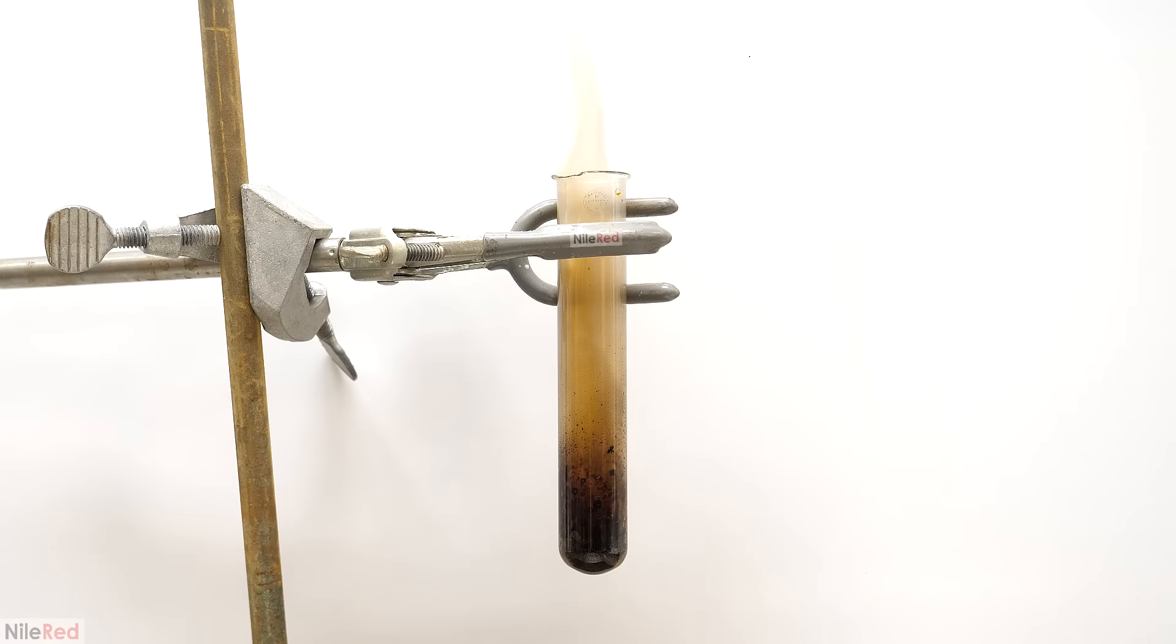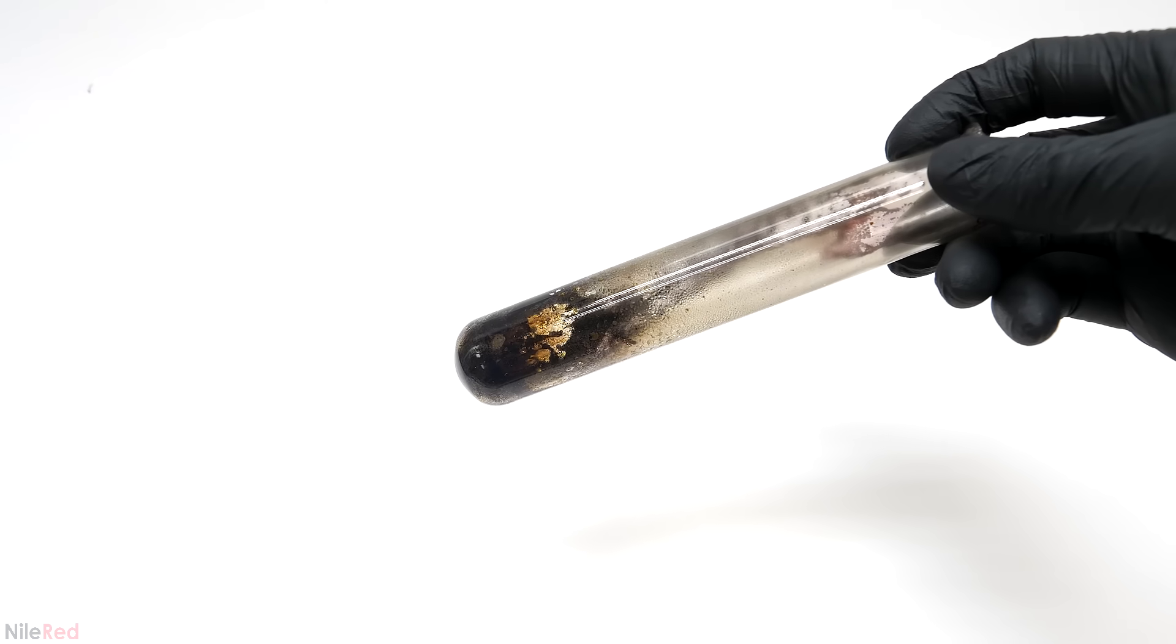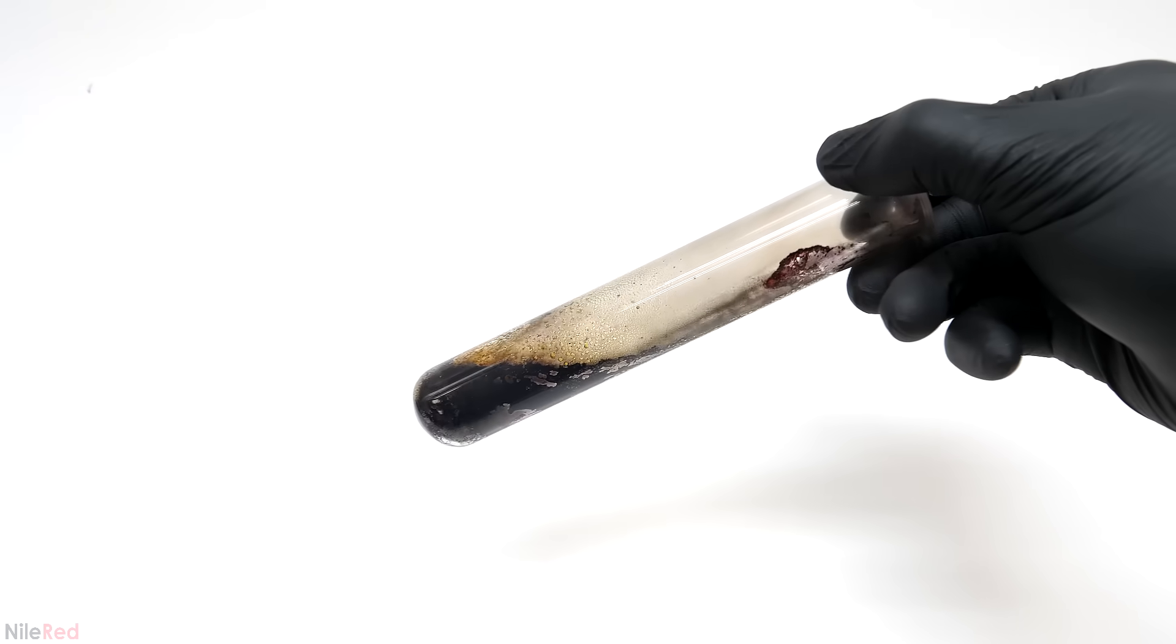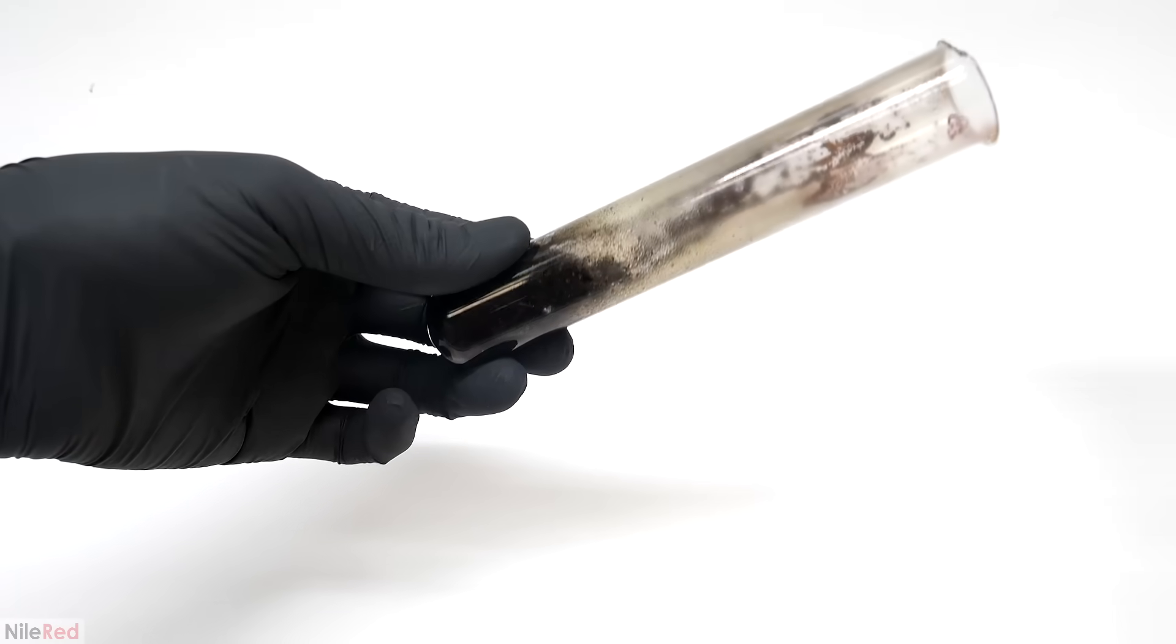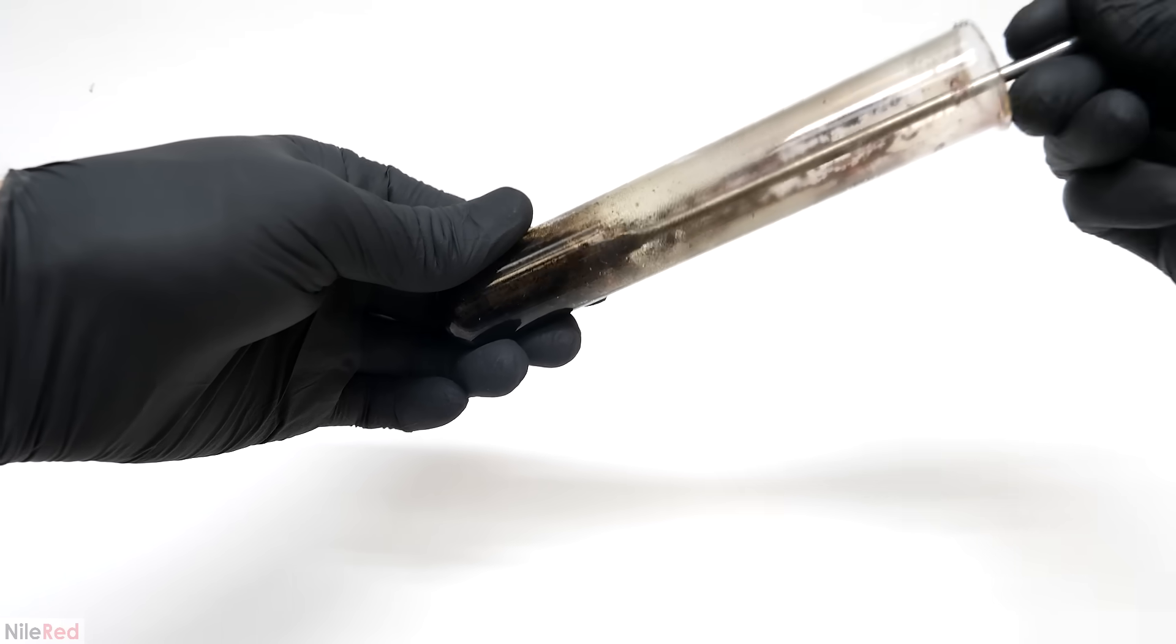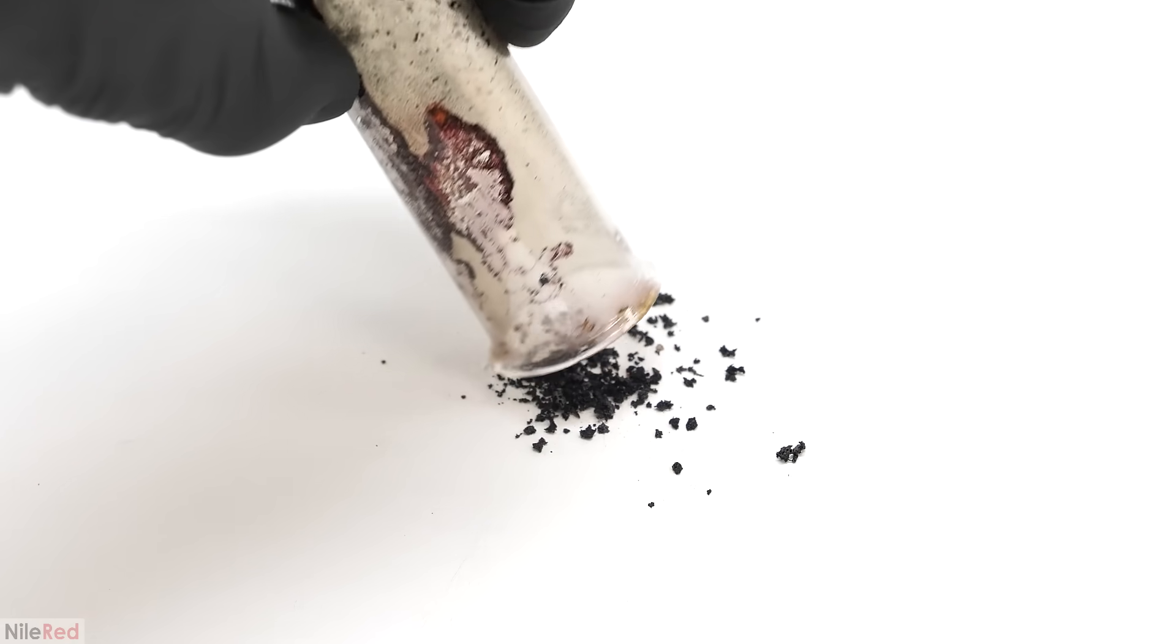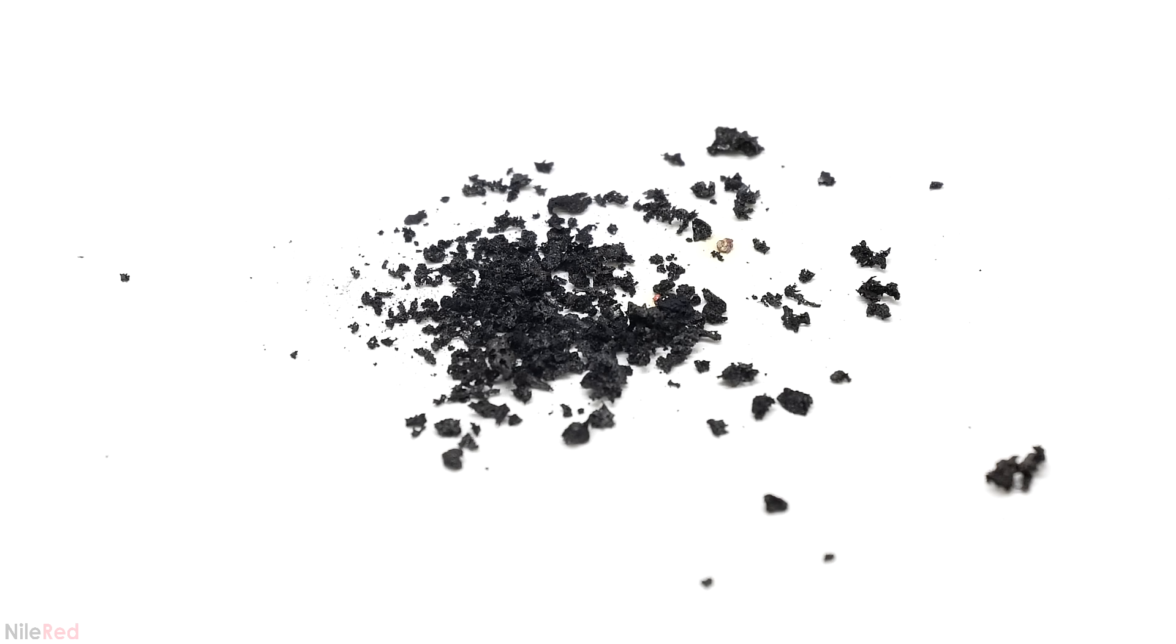There was also a second firing, which was kind of interesting. I waited for the tube to cool and for all the gases to go away, and then I broke up all the solid stuff. I'm not 100% sure what this is, but I imagine it's a nice combination of carbon and a bunch of side products. I think that most of the aniline though, was converted to gases like steam, CO2, nitrogen, and nitrogen oxides. In full-sized rockets, this residue can also form, and it can cause the combustion chamber to get jammed up. I think the amount that was formed here was excessive though, because my ratio of aniline to nitric acid was definitely not ideal. Also, a real rocket maintains a much higher temperature, which helps burn everything away.